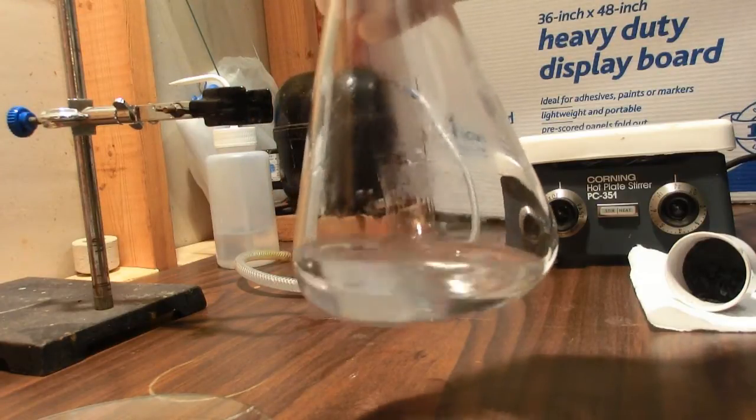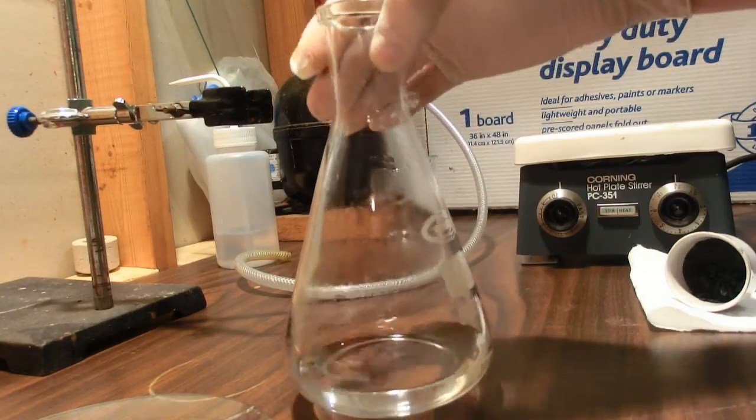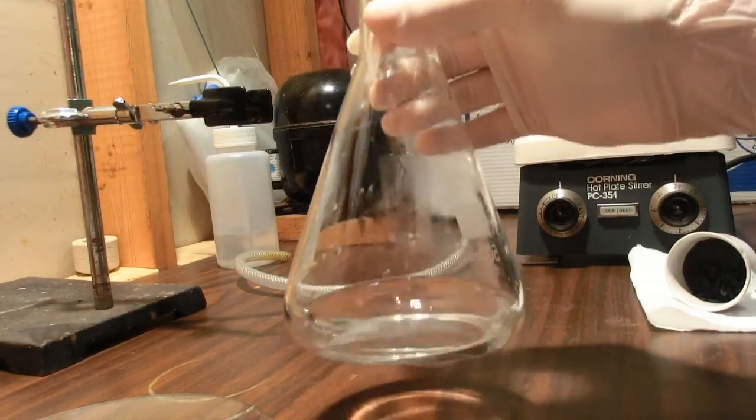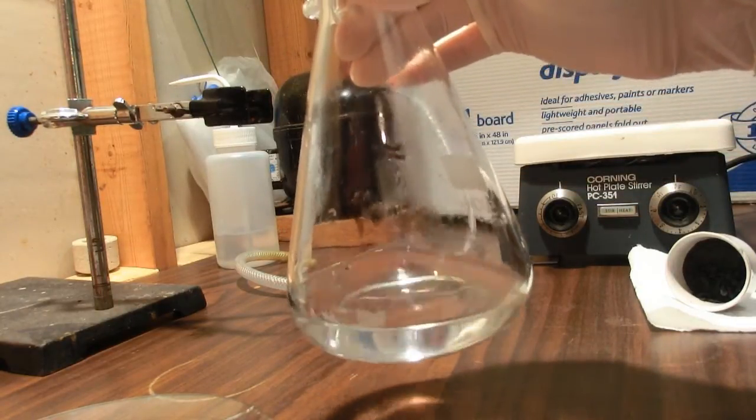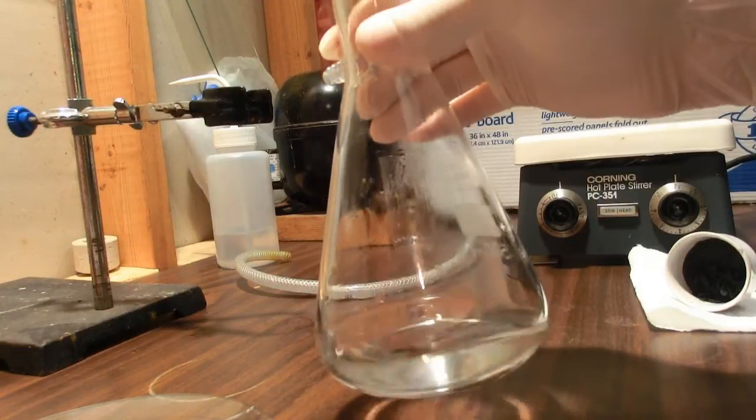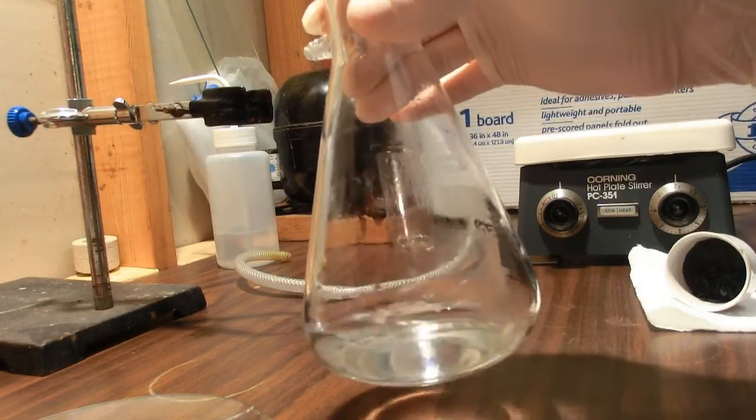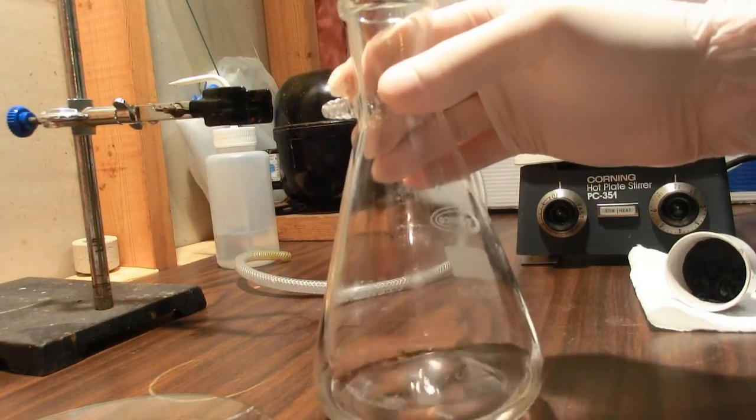So the next step we're going to do is precipitate basic lead carbonate from this by adding baking soda or sodium bicarbonate, and this will make our white lead.